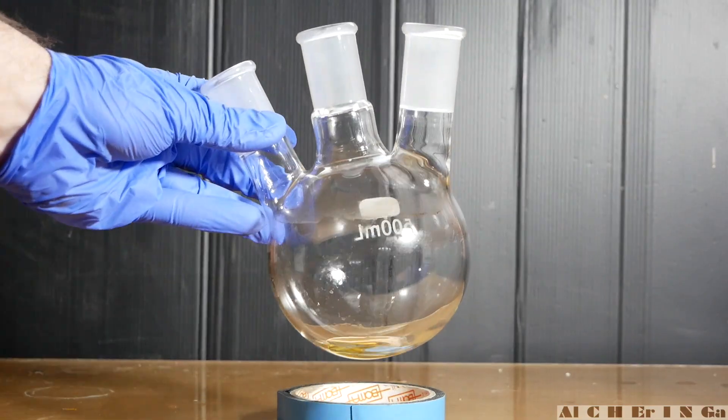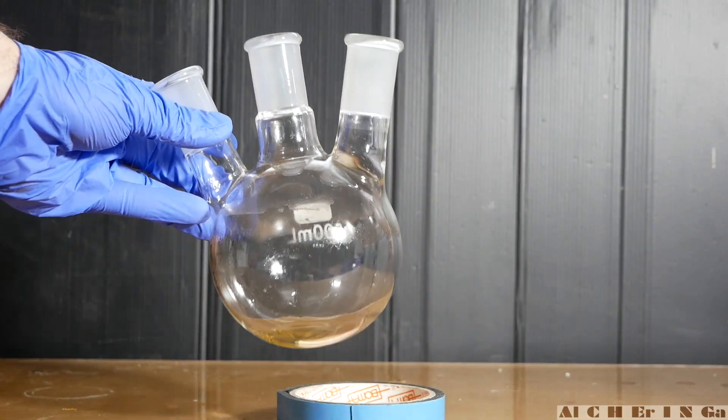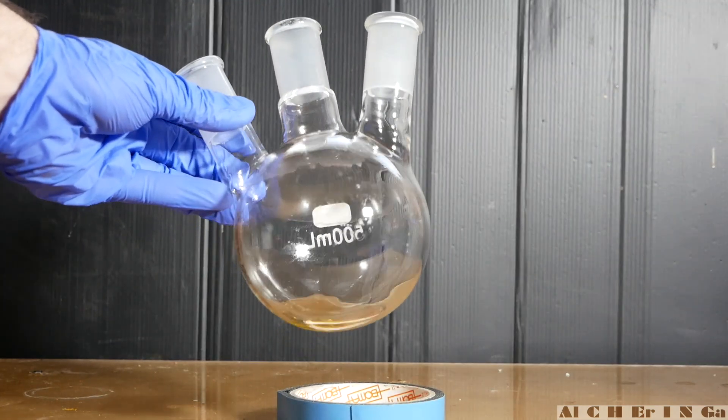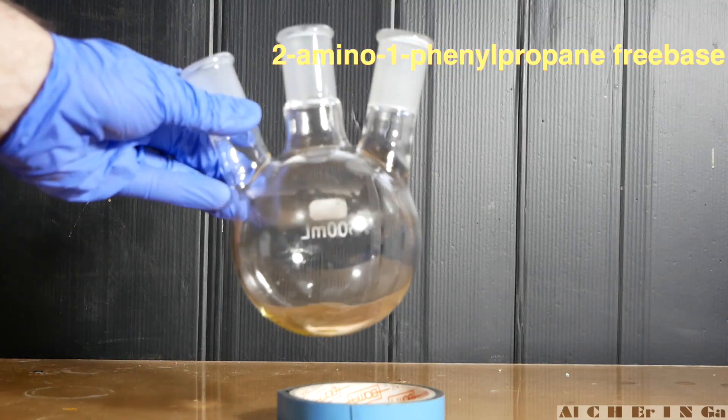Get the cleaned organic layer and remove the dichloromethane using a rotary evaporator or by distillation. As we can see, there is a yellow oil. This is 2-amino-1-phenyl-propane free base.